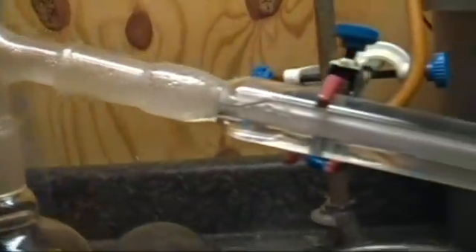Also be aware that any condensed water that falls from the thermometer or the sides instantly vaporizes on contact with the oil. If your setup is not clamped tight, the sudden influx of steam can blow it apart. So please be careful. So here's what I got after distillation.